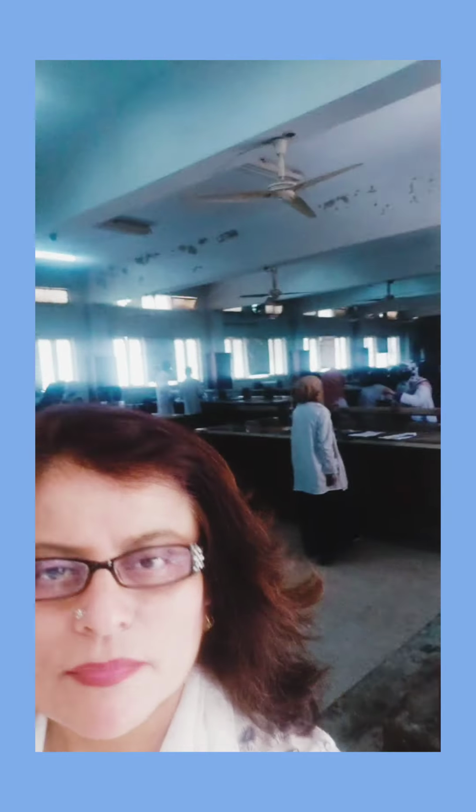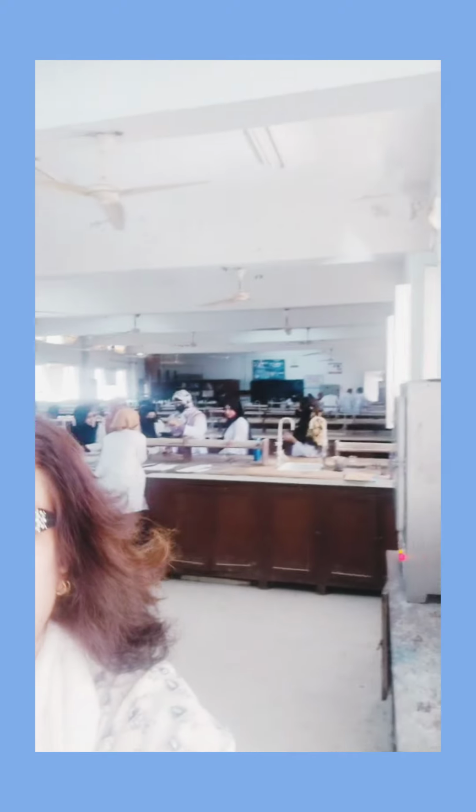So I can show you my students working in the lab. You can see my students here, the girls and the boys, they are doing it separately. Boys are at that corner and girls are here and they are working in the lab. It's the fourth organic preparation which they are doing. I'm happy that their speed and pace of completing their scheme is just perfect.